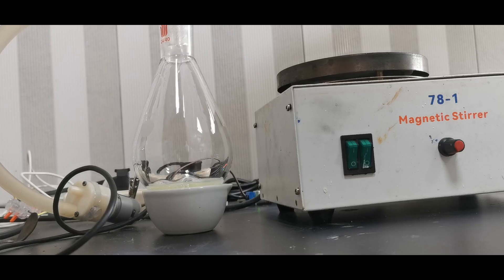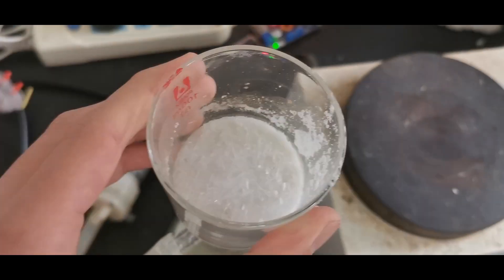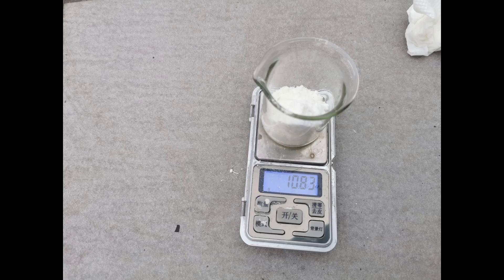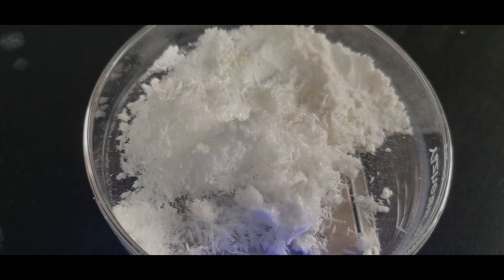After the mixture cooled to room temperature, I simply filtered it to harvest the second batch of crystals, and they weigh 4.5 grams. The two batches are combined and dried in the oven, and we end up with 10.83 grams of dry and mostly pure ammonium perchlorate.